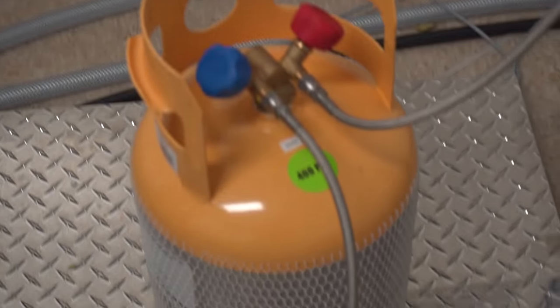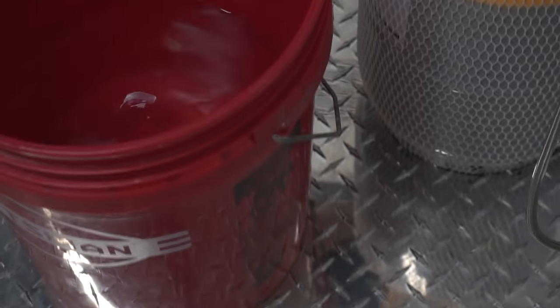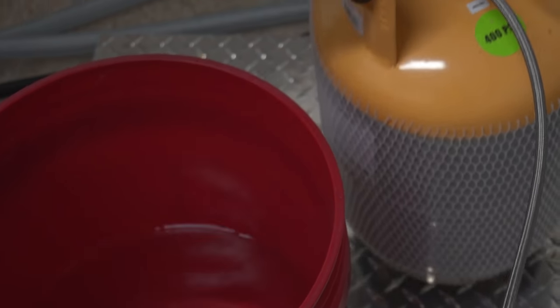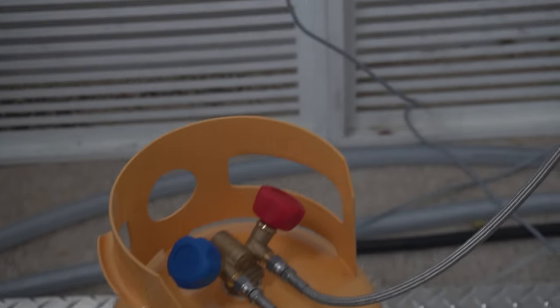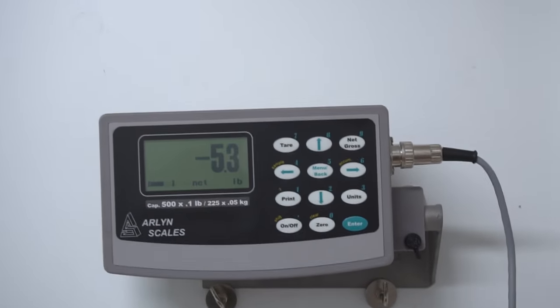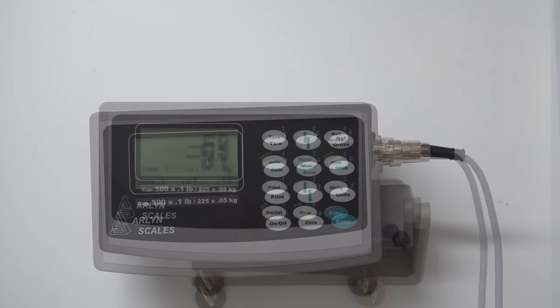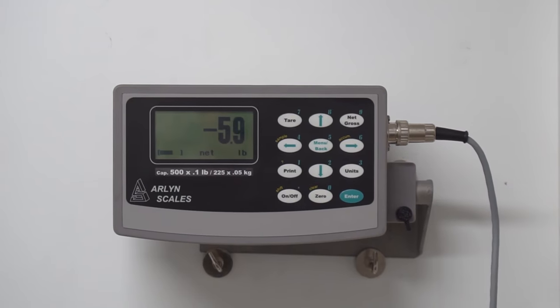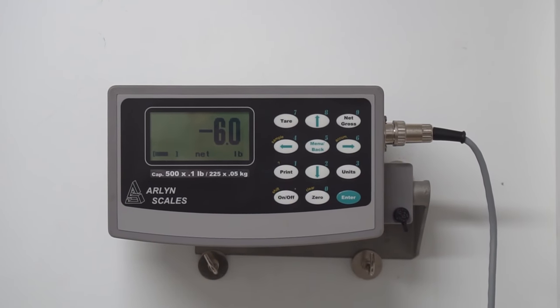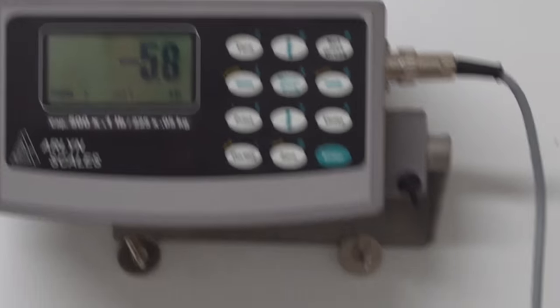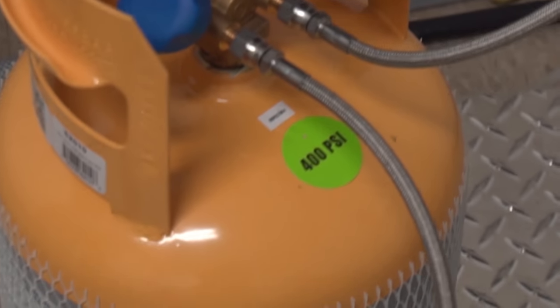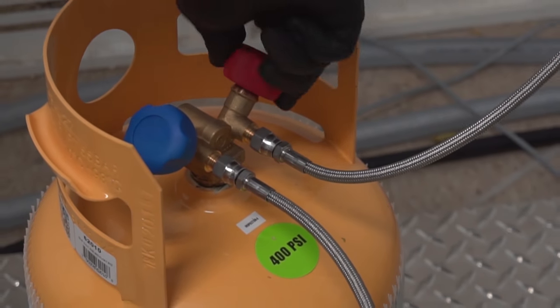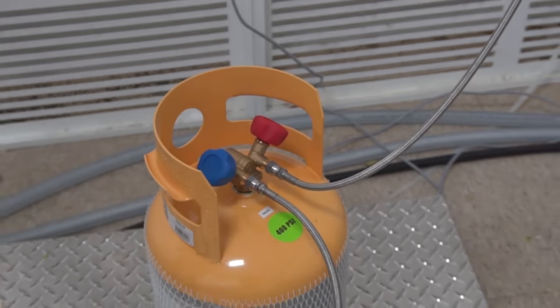This can be solved usually just by adding some warmth to your tank. So I'm going to give it a little demo right here. What I would do is get a bucket of warm water, put the butane right inside of it and make it warm. This would help us to boil off more butane and increase the pressure in the LP tank. We're just about at negative 6 pounds, which means 6 pounds evacuated from our LP tank into our extractor. I'm going to turn off the liquid valve now and the top valve of our extractor.